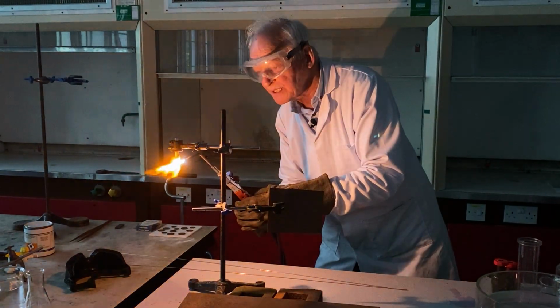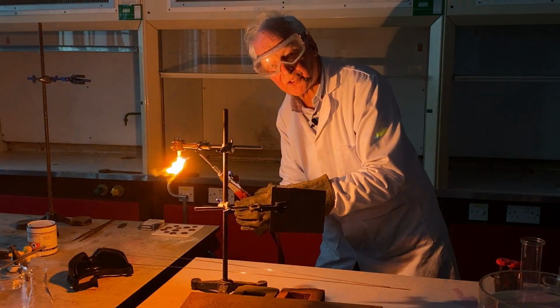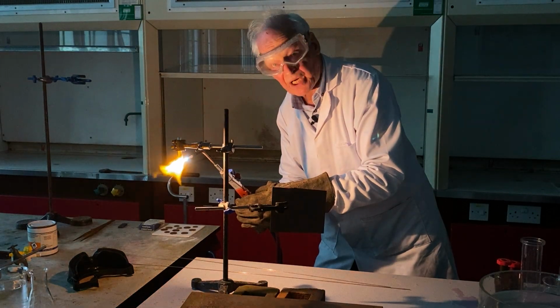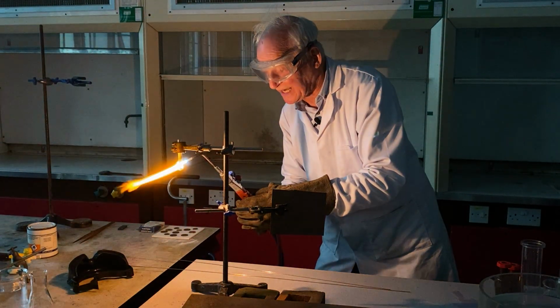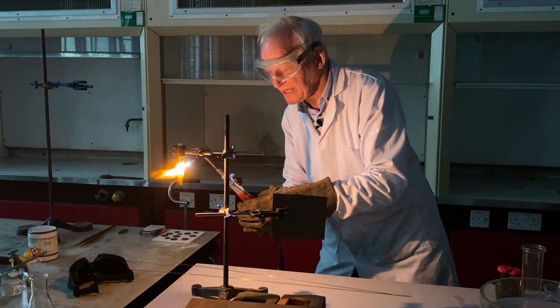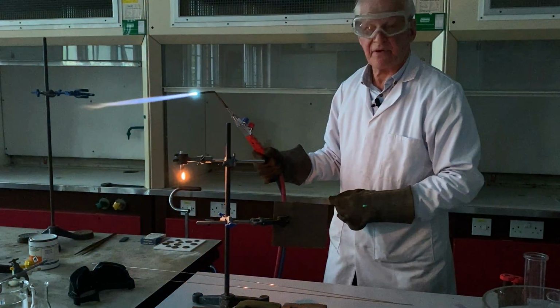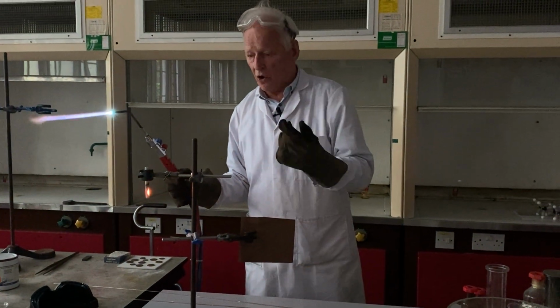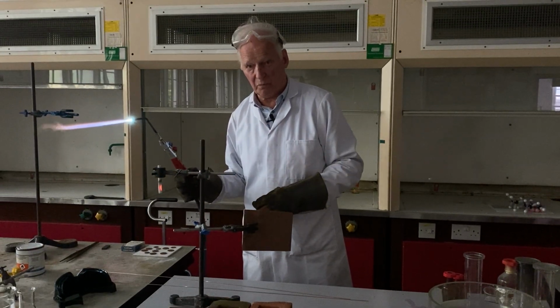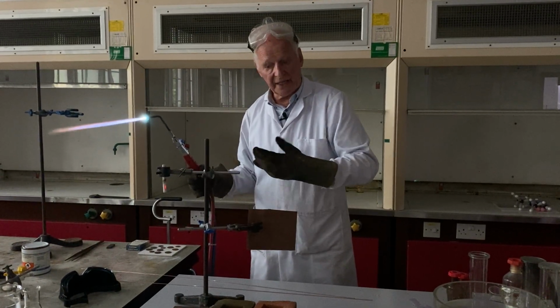Now, as you can see, I am now literally in the limelight, and I'm being illuminated, and I hope you could see very brightly indeed, a remarkable phenomenon, which I have no idea how to explain, but by gum, this is very, very bright indeed. And this, of course, was used in theatres by heating large lumps of lime to a very high temperature, and so there we have another very interesting effect of high temperatures, this time causing a chemical reaction once again. It's the thermal decomposition of calcium carbonate into calcium oxide and carbon dioxide, and this gives off light energy.